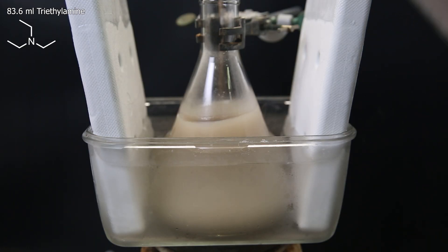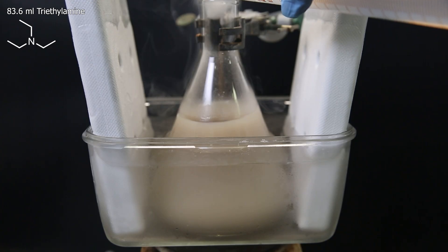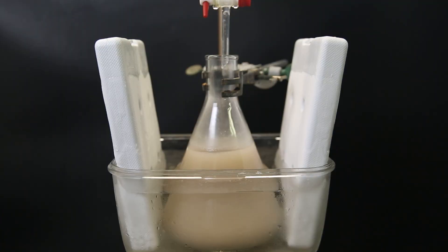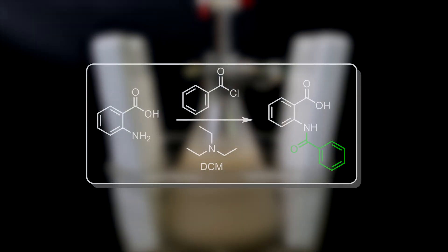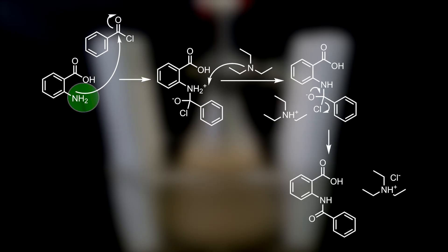I measured it out in the same cylinder, so it became a bit cloudy, but it doesn't matter. I first added in a tiny bit to check the reaction, and then drip it in slowly with a sep funnel. In this reaction, anthranilic acid reacts with benzoyl chloride in the presence of a base to give the corresponding amide.